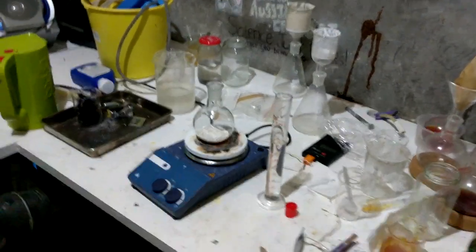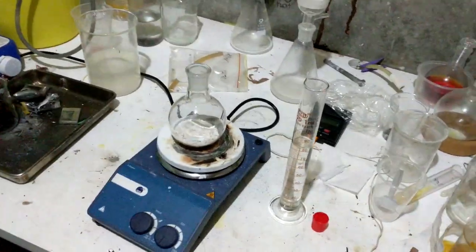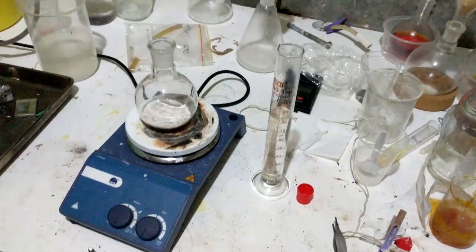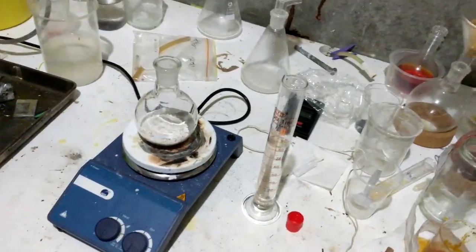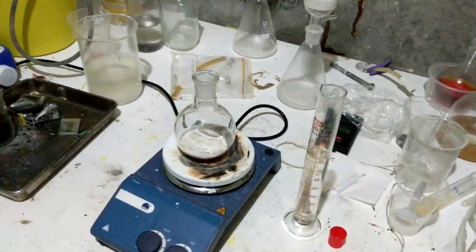Hello, welcome back. Lovely to see you all again. So in this video we're trying to convert the aminoguanidine bicarbonate that we've made into 5-aminotetrazole.